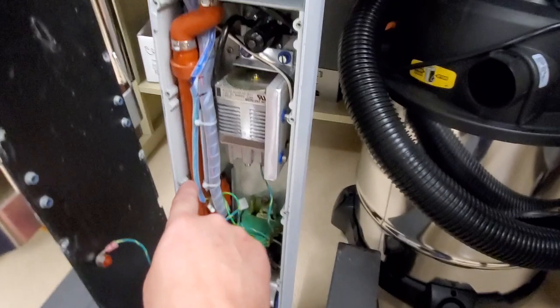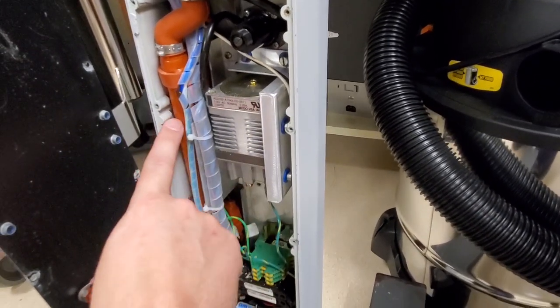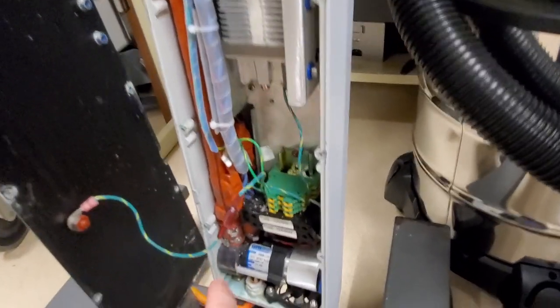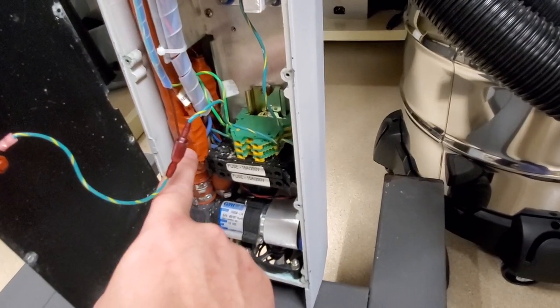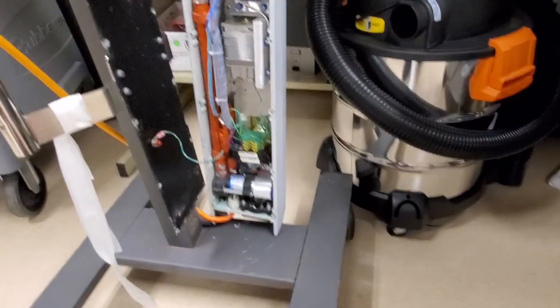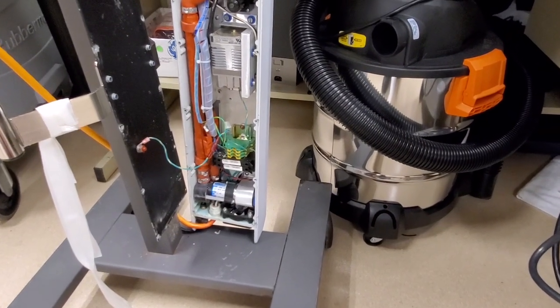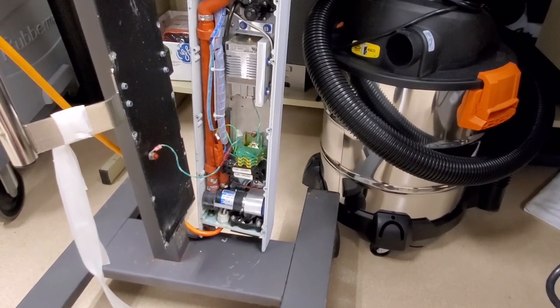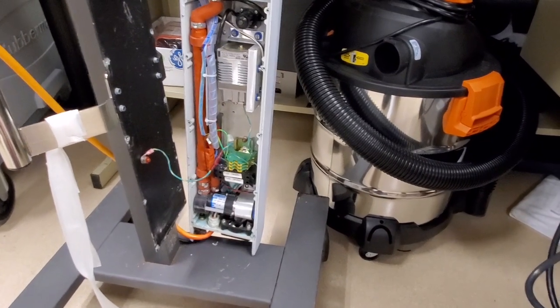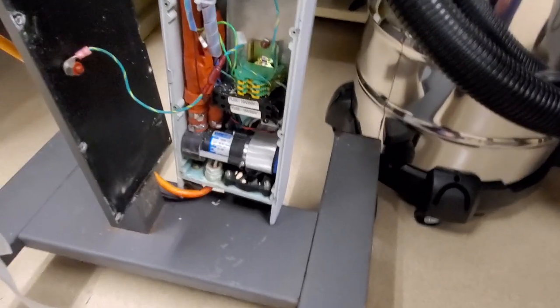So right here, I think that these units have two heaters. There's one in the back and there's one right here. They're elongated. Right here is a thermal cutoff and right back there is a thermal cutoff. And I don't know enough about this unit to determine if those turn on and turn off like resettable fuses or if they're permanent cutoff safety fuses for temperature overload. I don't really know. But anyway, they're there.